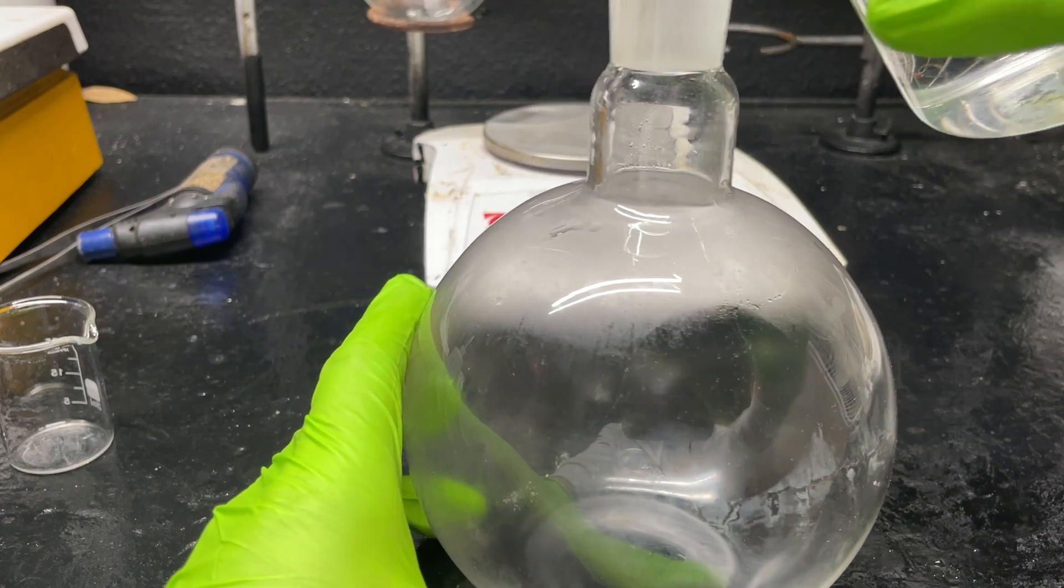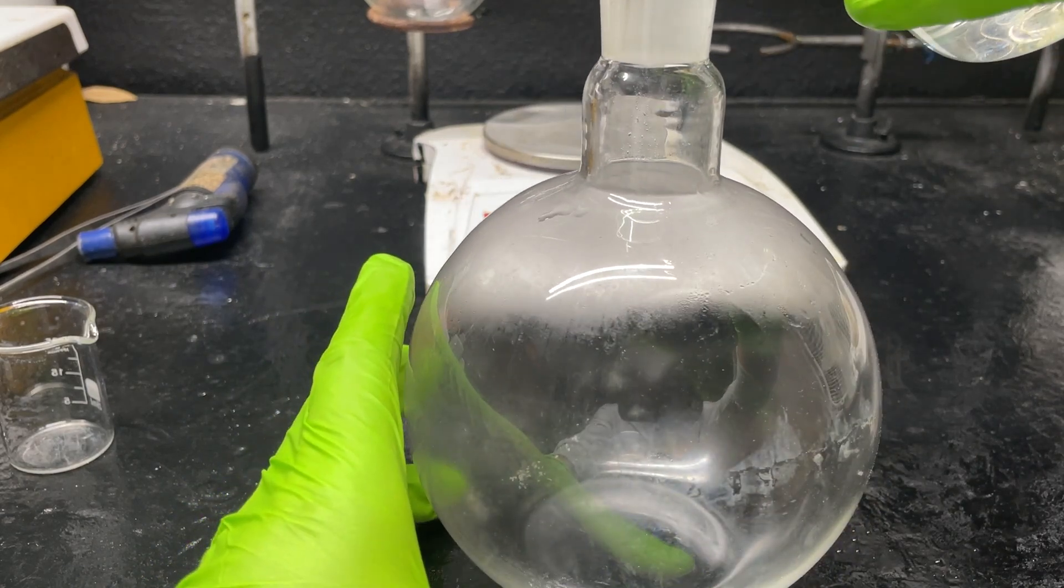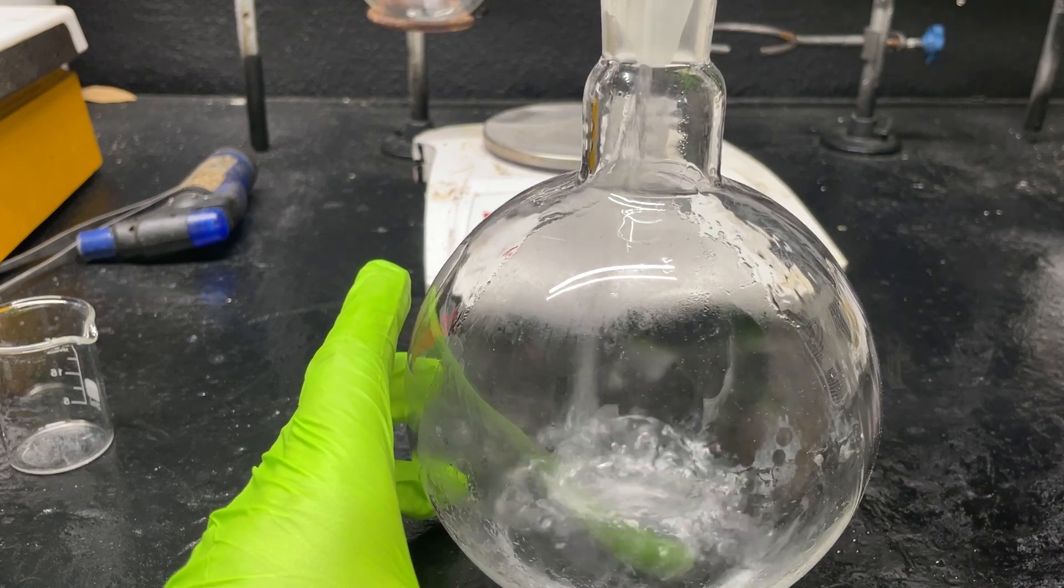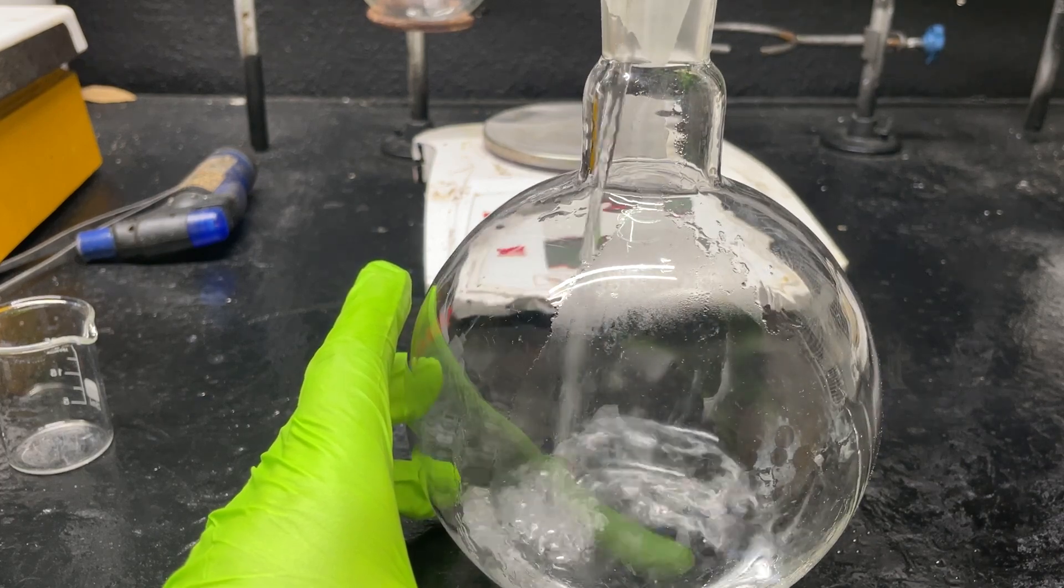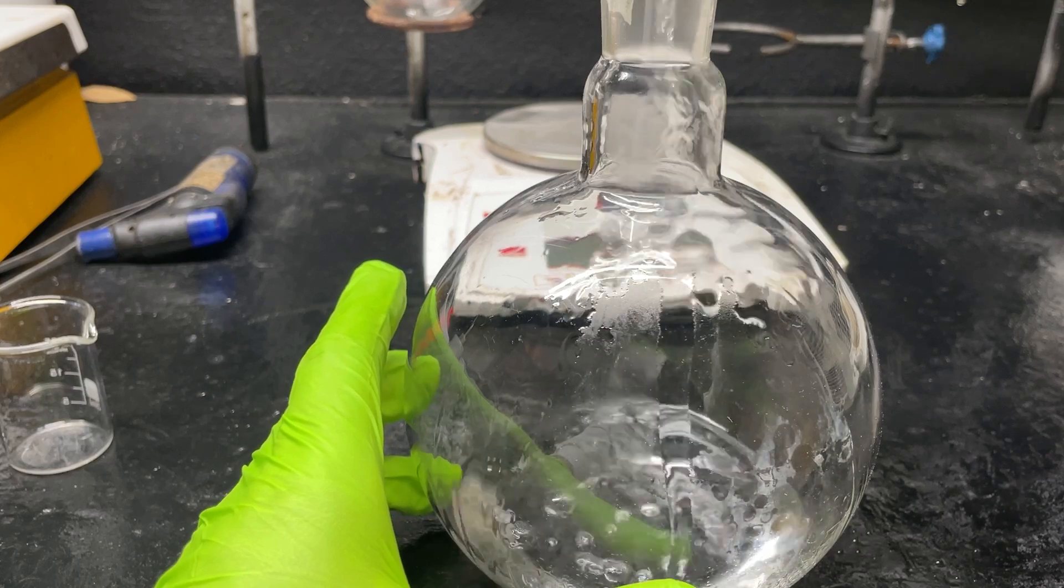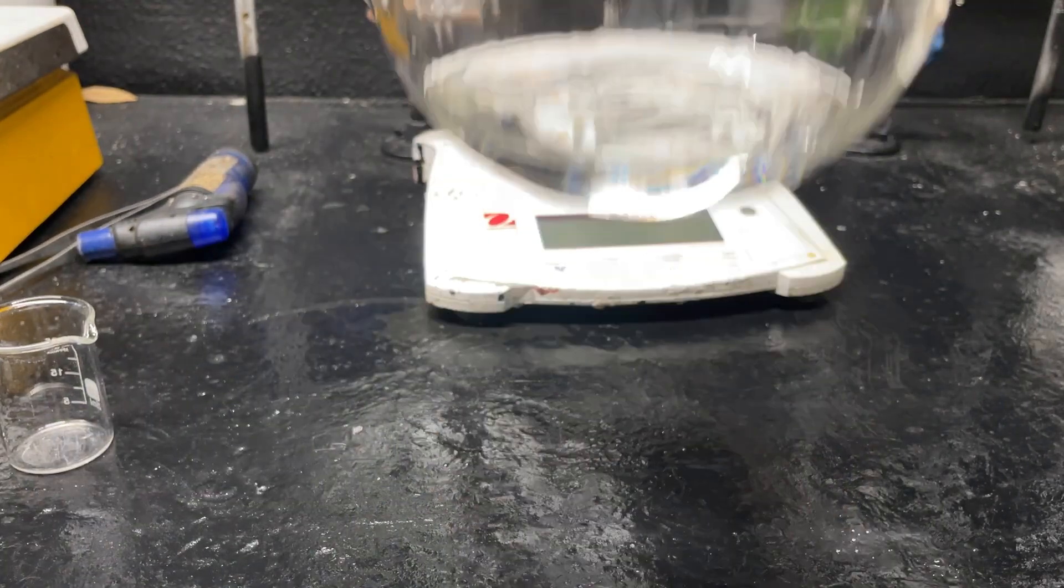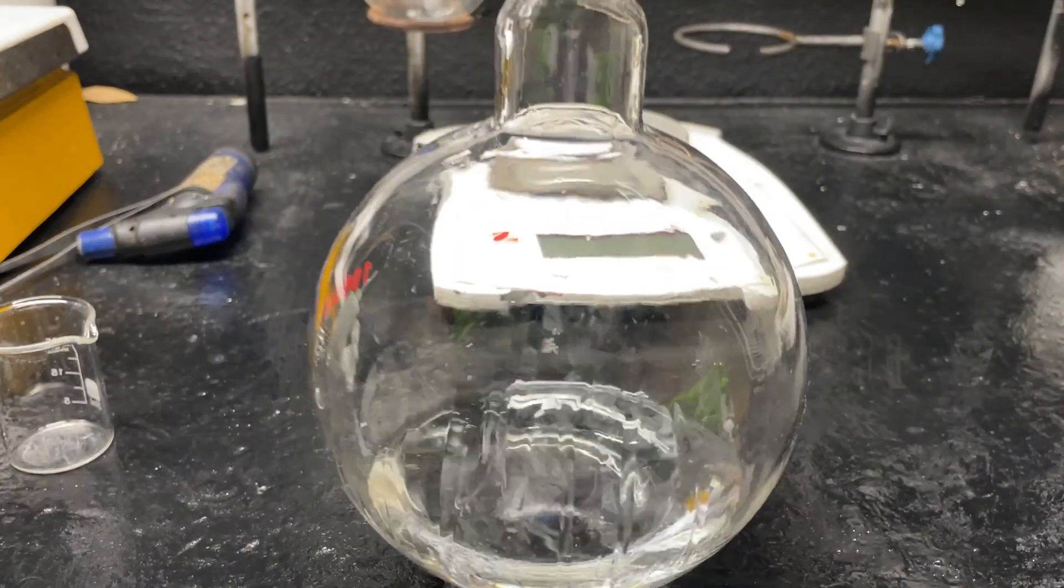Let's go ahead and add in 100 milliliters of our pure acetic acid into this thousand milliliter round bottom flask. It's actually kind of a flat bottom round bottom - you see the bottom of it's flat, so I don't know what you even call that.